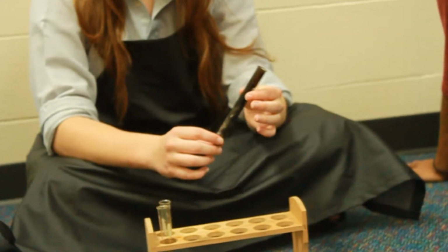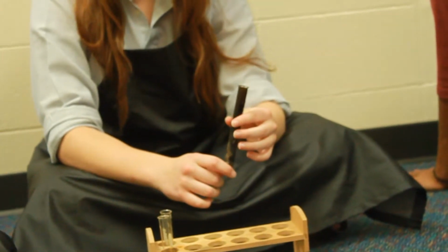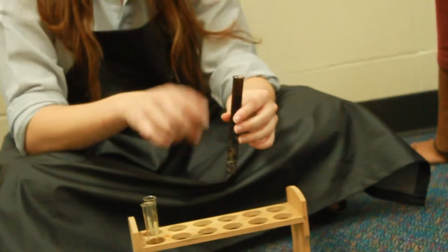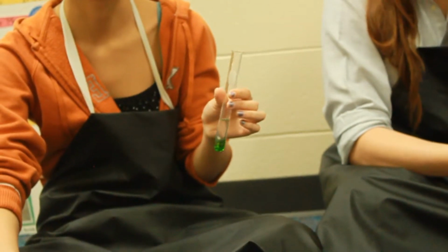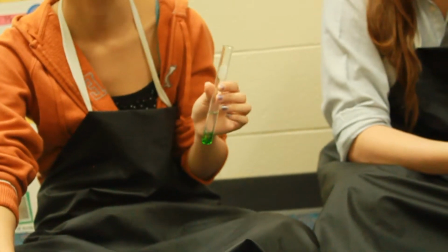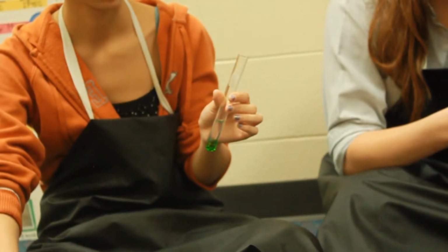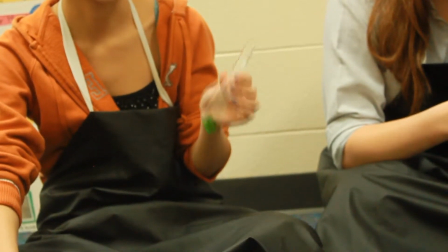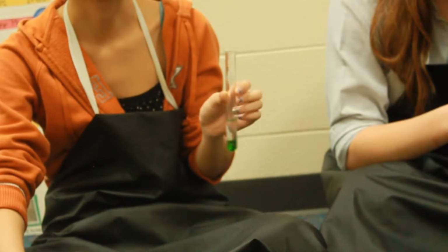We heated up potassium nitrate to make it molten, and then we added gummy bear to it, and it made a pretty violent reaction. The gummy bear jumped and stuff. So it was the most exothermic oxidizing agent, so it was the strongest. For this one, we boiled hydrogen peroxide, and we added the gummy bear. There was a little reaction, a few bubbles, not that much. And the gummy bear melted. So basically, this is the weakest oxidizing agent.